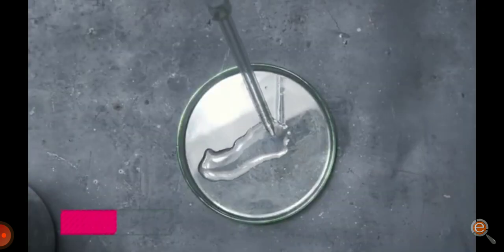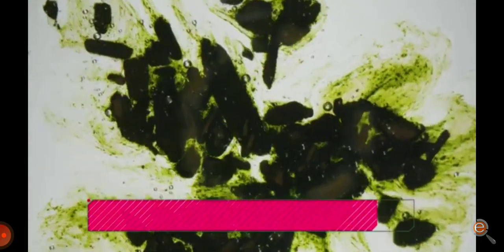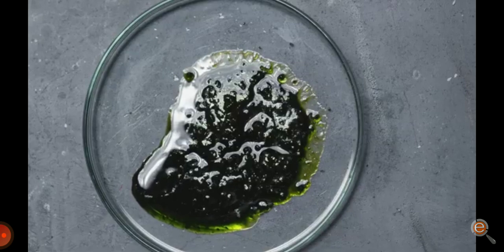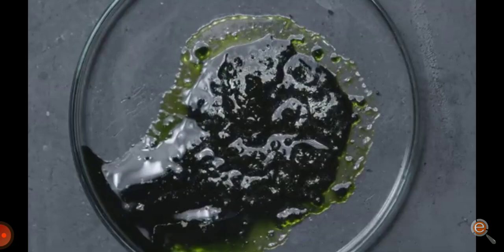Take a pipette of concentrated sulfuric acid and put it in a Petri dish. Then you want to mix in a small amount of potassium permanganate to it. As soon as they are mixed, the sulfuric acid reacts with the potassium permanganate to make permanganic acid. This acid is then dehydrated by the sulfuric acid, and it forms the anhydride version. This new molecule is a combination of two permanganic acids.